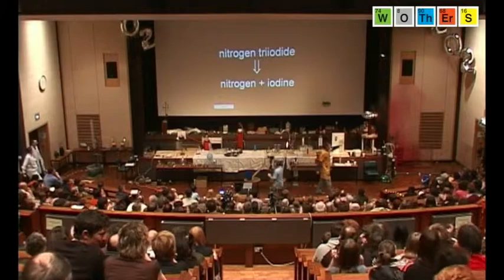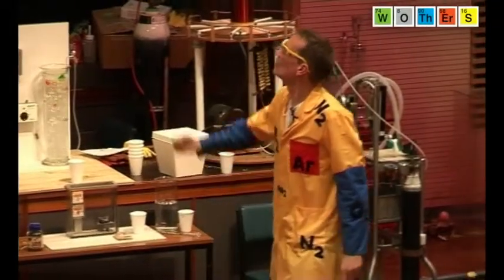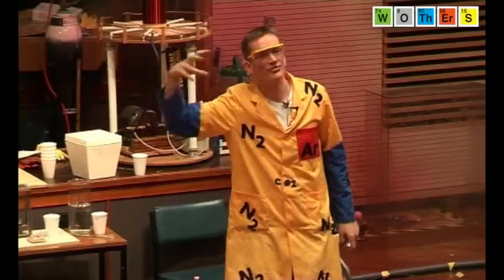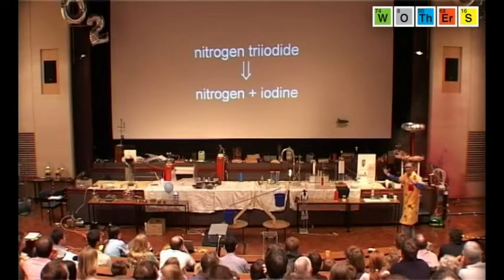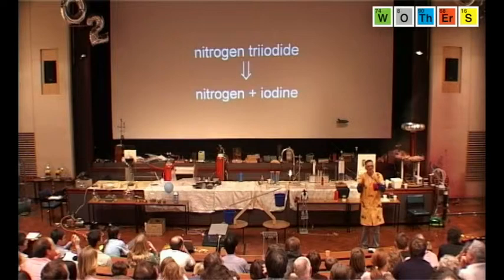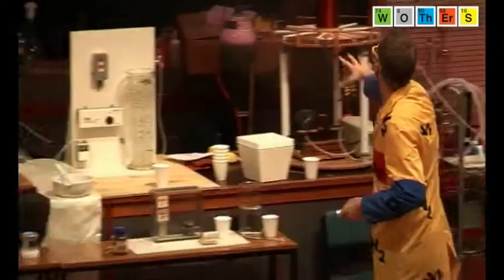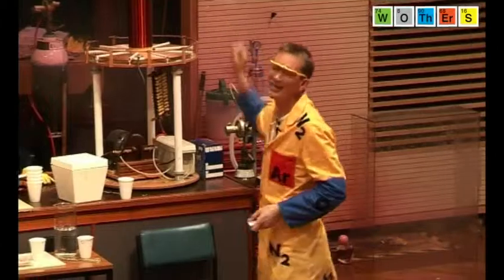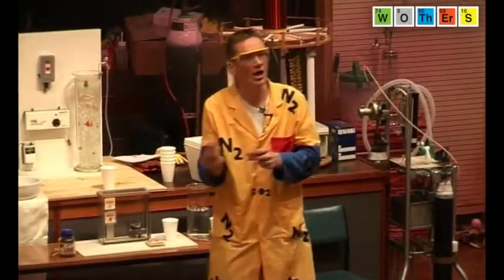The reaction taking place there was this very reactive nitrogen triiodide that isn't very stable. Instead, it reforms with nitrogen combining with itself — nitrogen gas, N2 — and also the iodine. The purple cloud that we see there is actually the iodine, and this is the sort of thing that you might put on a cut.